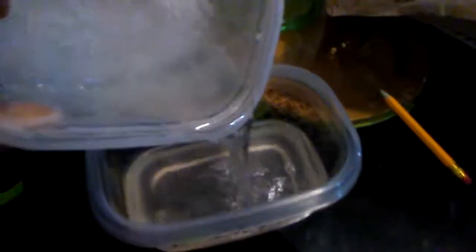It's been about two and a half hours, so I guess that's done. For efficiency, I'm going to save this solution and put it back in the freezer to see if anything else precipitates out. But as you can see, I got about 100 grams. Cool — my name's Dennis Pulley.